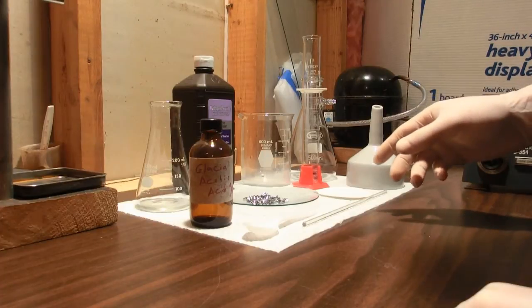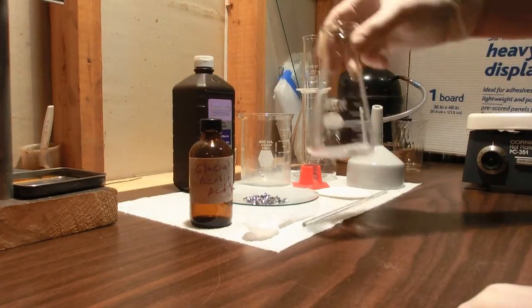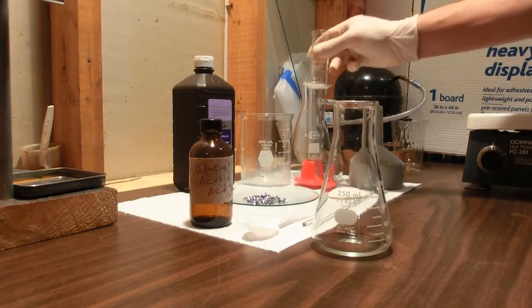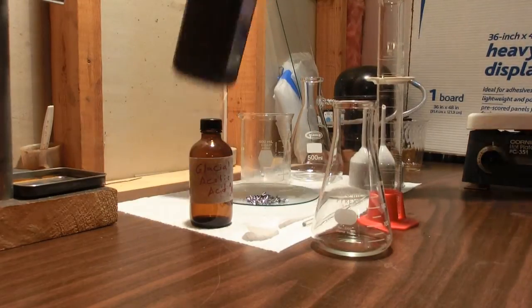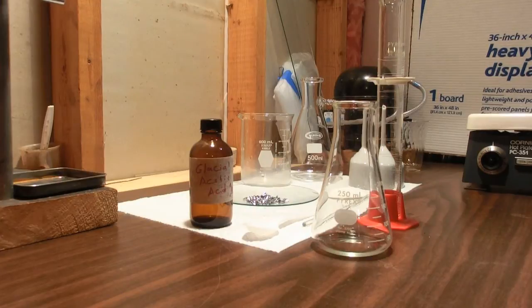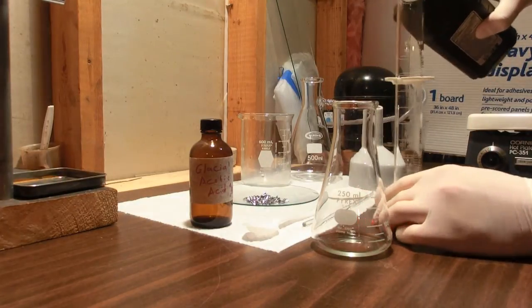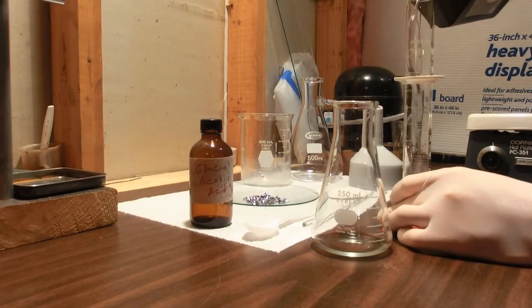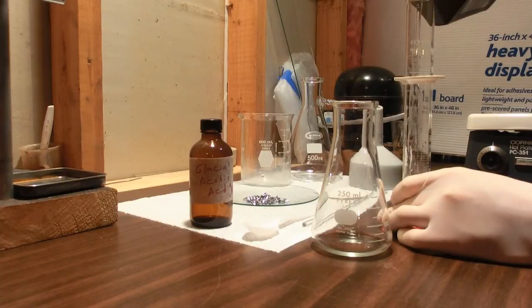So what we want to do is take our acetic acid and we want to put about 100 milliliters of hydrogen peroxide into there. This is just a rough estimate. It doesn't have to be that precise. This is 3% so we need a good bit. I'm going to do my additions in two steps. I'm going to put 50 in first and then add 50 later.